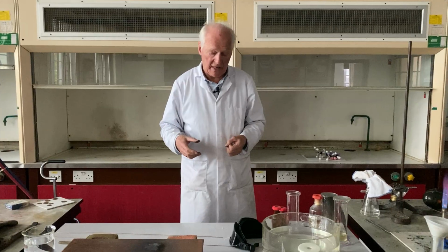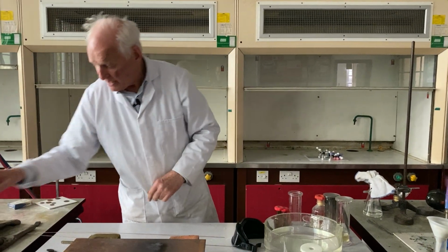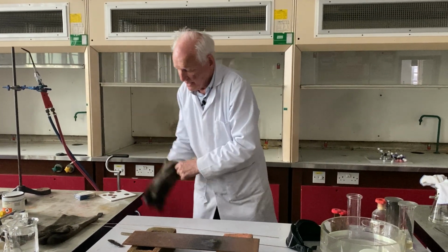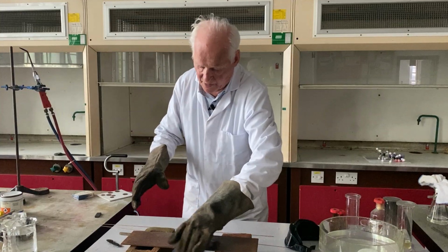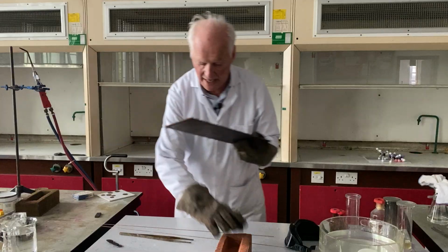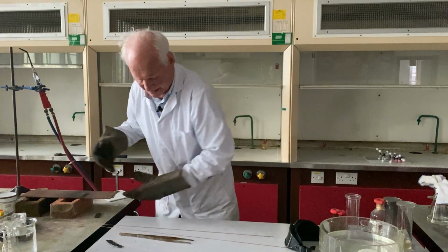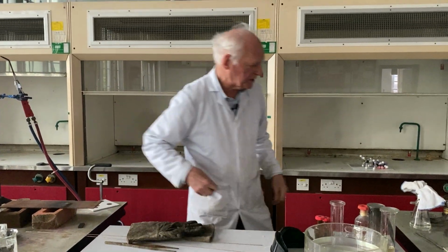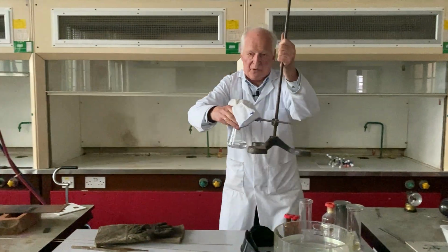However, there is a nice experiment which I'm going to try and show in front of you here. I'm going to just move around my apparatus a little bit for this purpose. Now, first of all, I'm going to move my bricks. This is very, very hot indeed. Obviously, not that hot, otherwise I wouldn't be holding it with my gauntlets. So there we've moved our metal plate. We should certainly keep our 7p coin in view because that's well worth keeping. And here we have our final piece of apparatus.